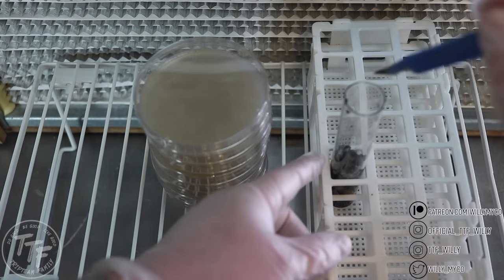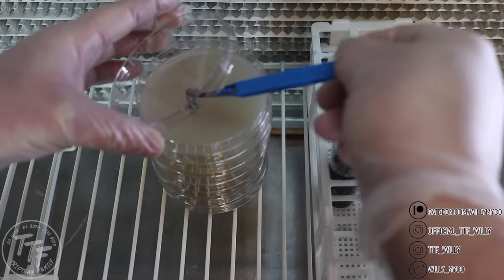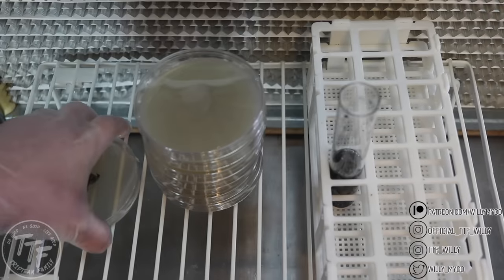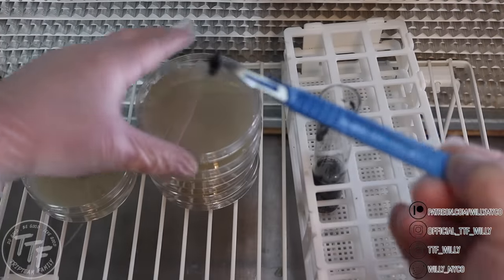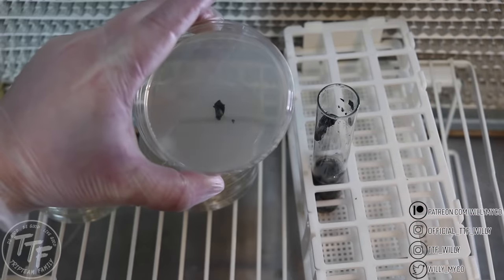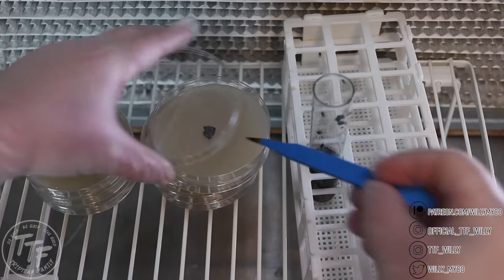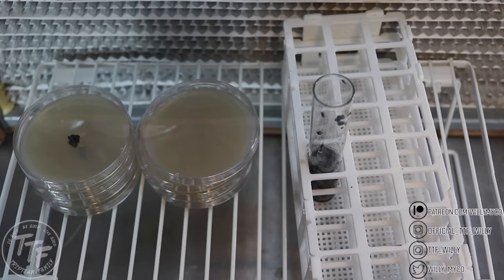Remove the cap from the tube, go in with the scalpel, grab some tissue, and place it on the agar — just like that. Do that to a few dishes. You don't need to flame sterilize every time you go back in, but you can if you want. Take a little bit of tissue and put it right onto the agar. Finish up the rest of the plates — you guys got the gist of it. It's as simple as that.